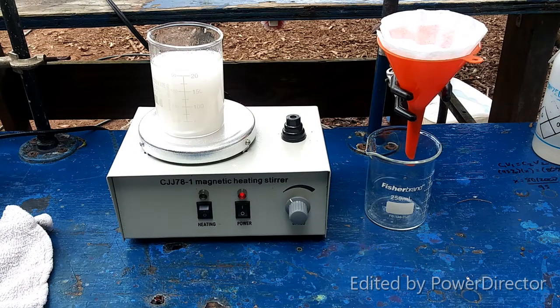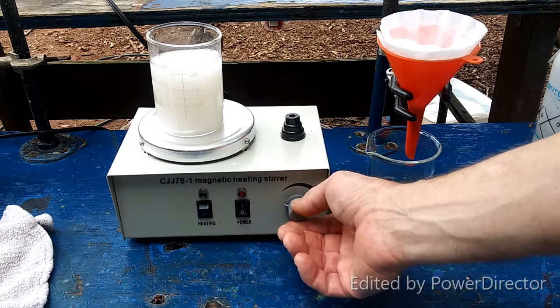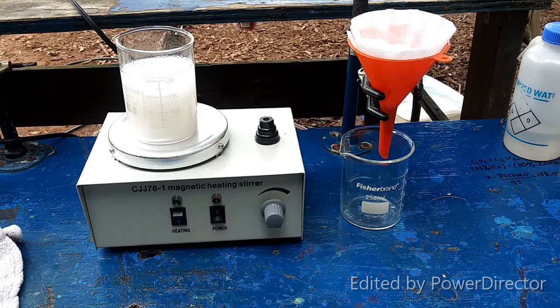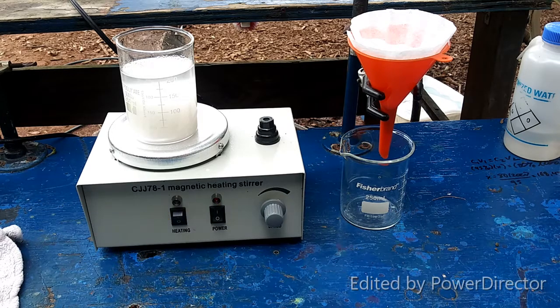I skipped on the idea of chilling down this mixture. The reason being, ammonium chlorate is actually only slightly soluble in ethanol, which is probably why we had to use four times the volume of the liquid and 80% ethanol only, so that the ammonium chlorate would still stay dissolved. It's been stirring for a little while and is at room temperature, so I'm just going to filter this now into this beaker. The textbook says to distill off the ethanol, but I may just come up with something different rather than full-on distillation. I'll come back when this is all filtered out.